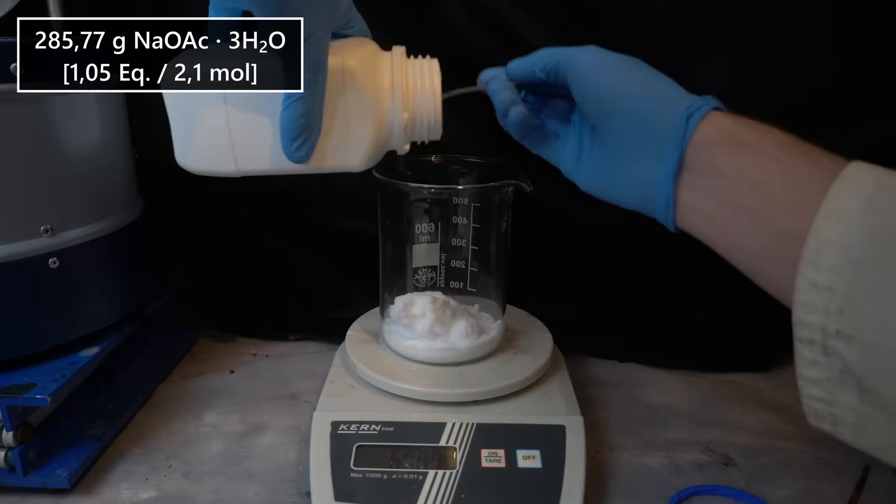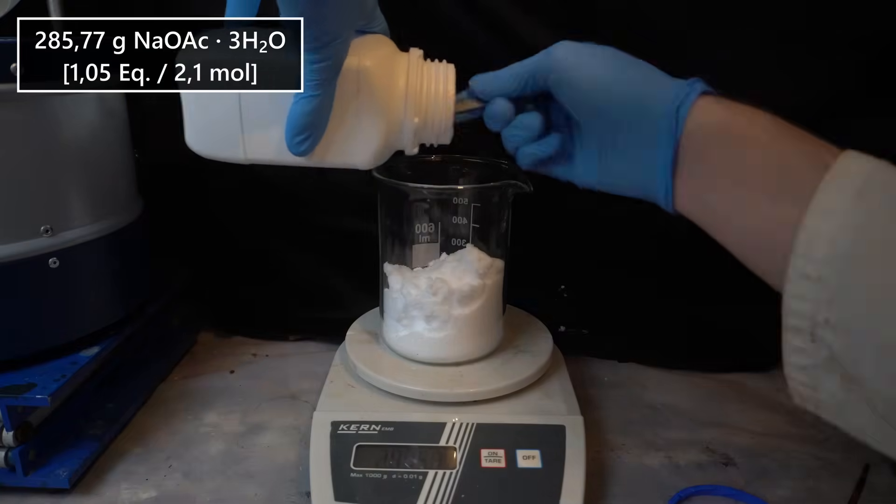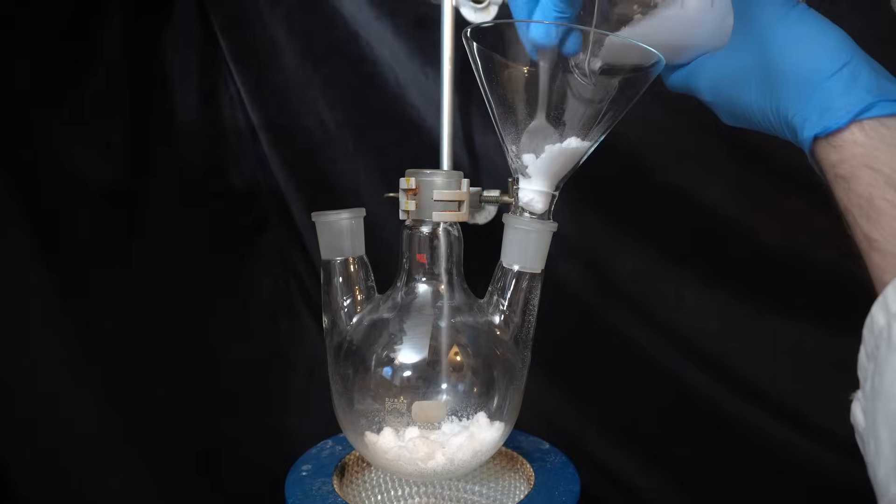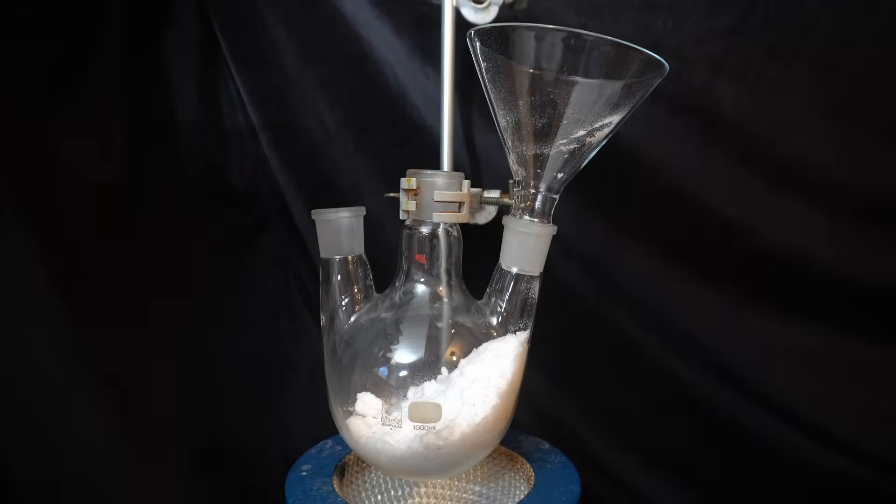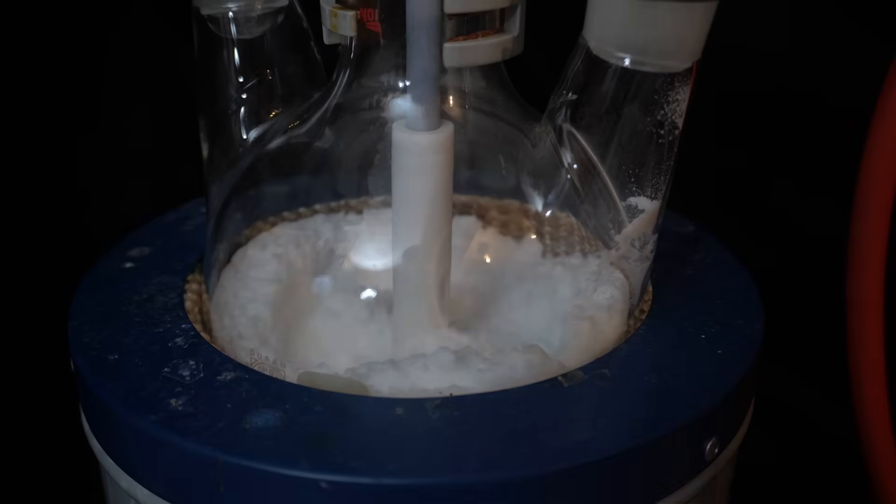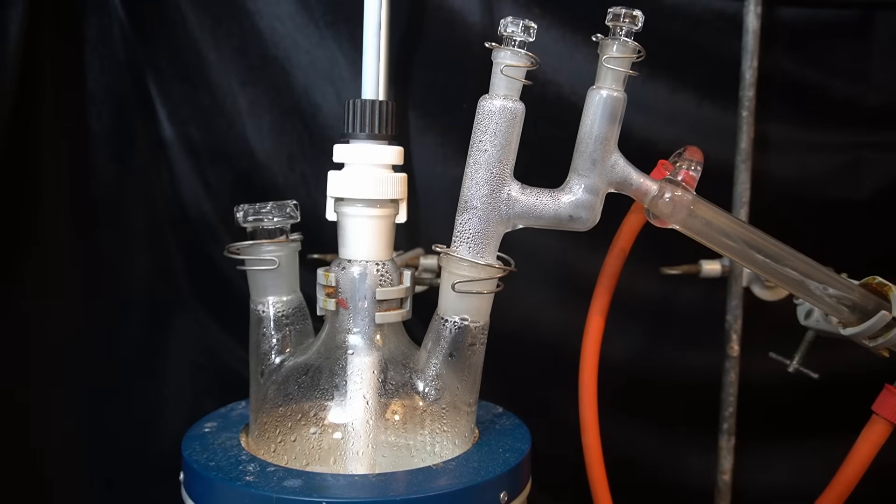I weigh out 286 grams of sodium acetate trihydrate and fill it into a 1 liter round bottom flask. At first, I wanted to try distilling the water out of the reaction flask directly, as this would allow me to keep everything in a single container. And while mechanical stirring works really well at the beginning, where the sodium acetate is a free-flowing powder, it will clump together into an extremely hard mass as the dehydration proceeds.